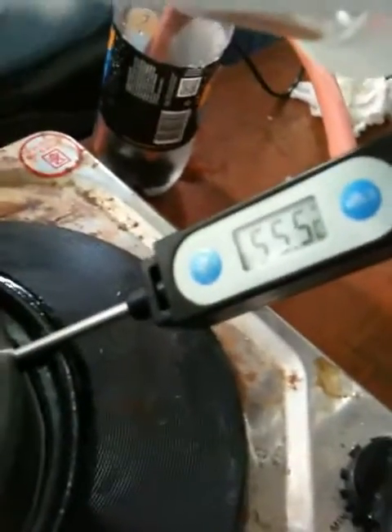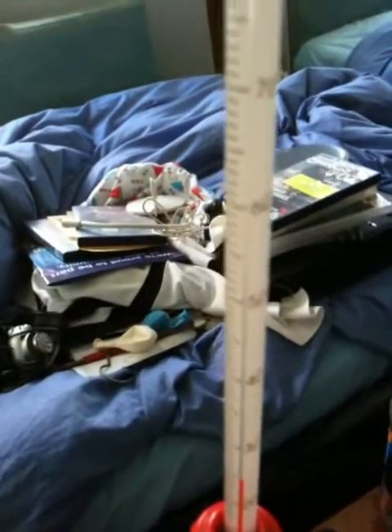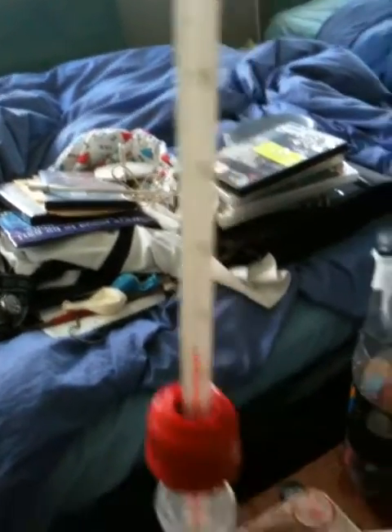The temperature of the oil is — the boiling point should be around this temperature. What I've done is raised it and added a bit of fresh oil inside just to cover the sides. I don't want to cover the whole thing because if it starts bubbling, it will bubble around the sides and smoke on the hot plate. But what I'm actually watching for is the temperature here. As you can see, it's still very low — I want it to be up around 40 to 50 degrees. So I've got everything turned on.